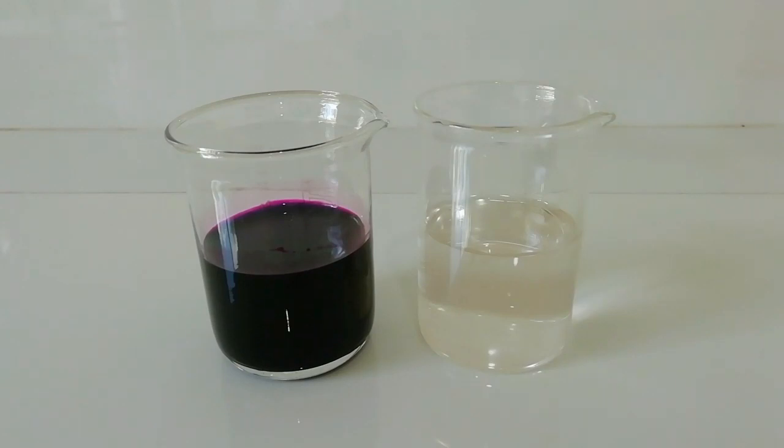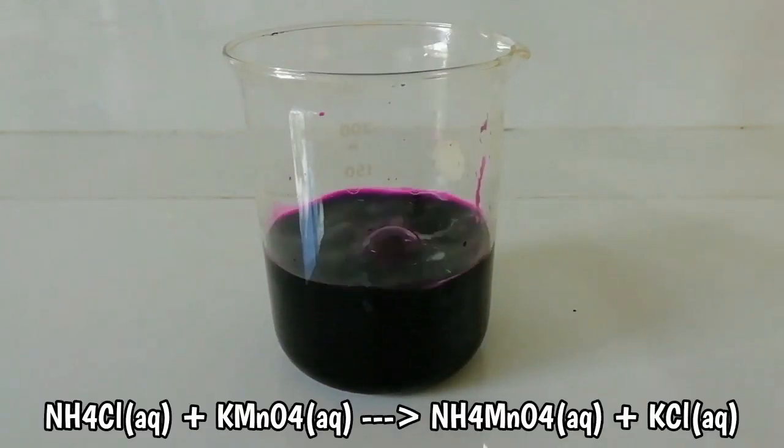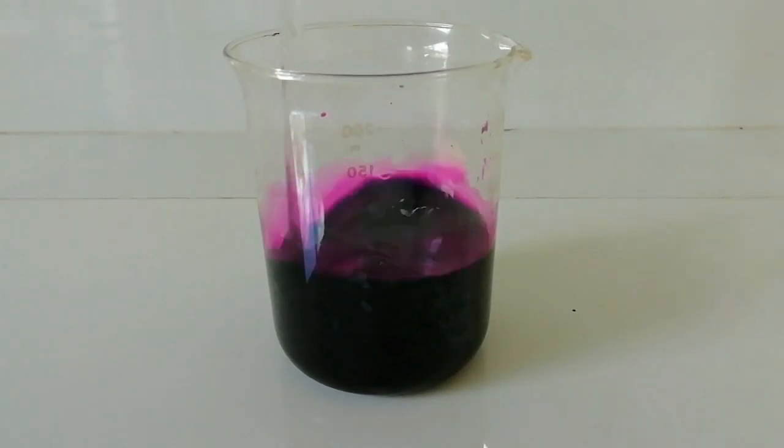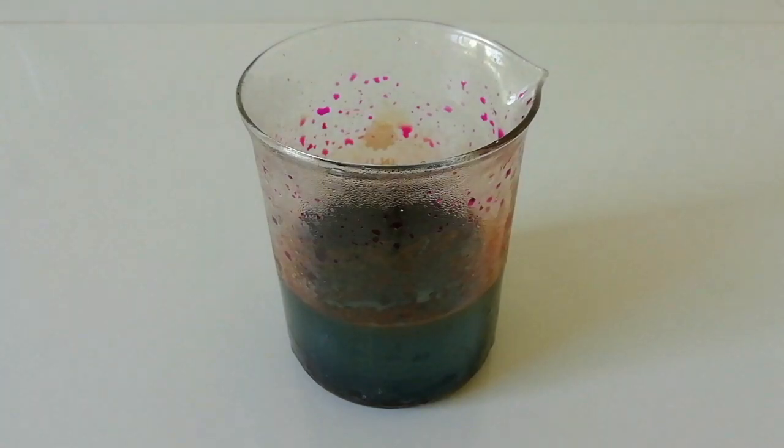After 24 hours of cooling in a freezer, now you can see here this is our reaction mixture. I think there are some ammonium permanganate crystals in the beaker, and also you can see here the solution is still very dark purple color because there are a lot of remaining permanganate in the solution.